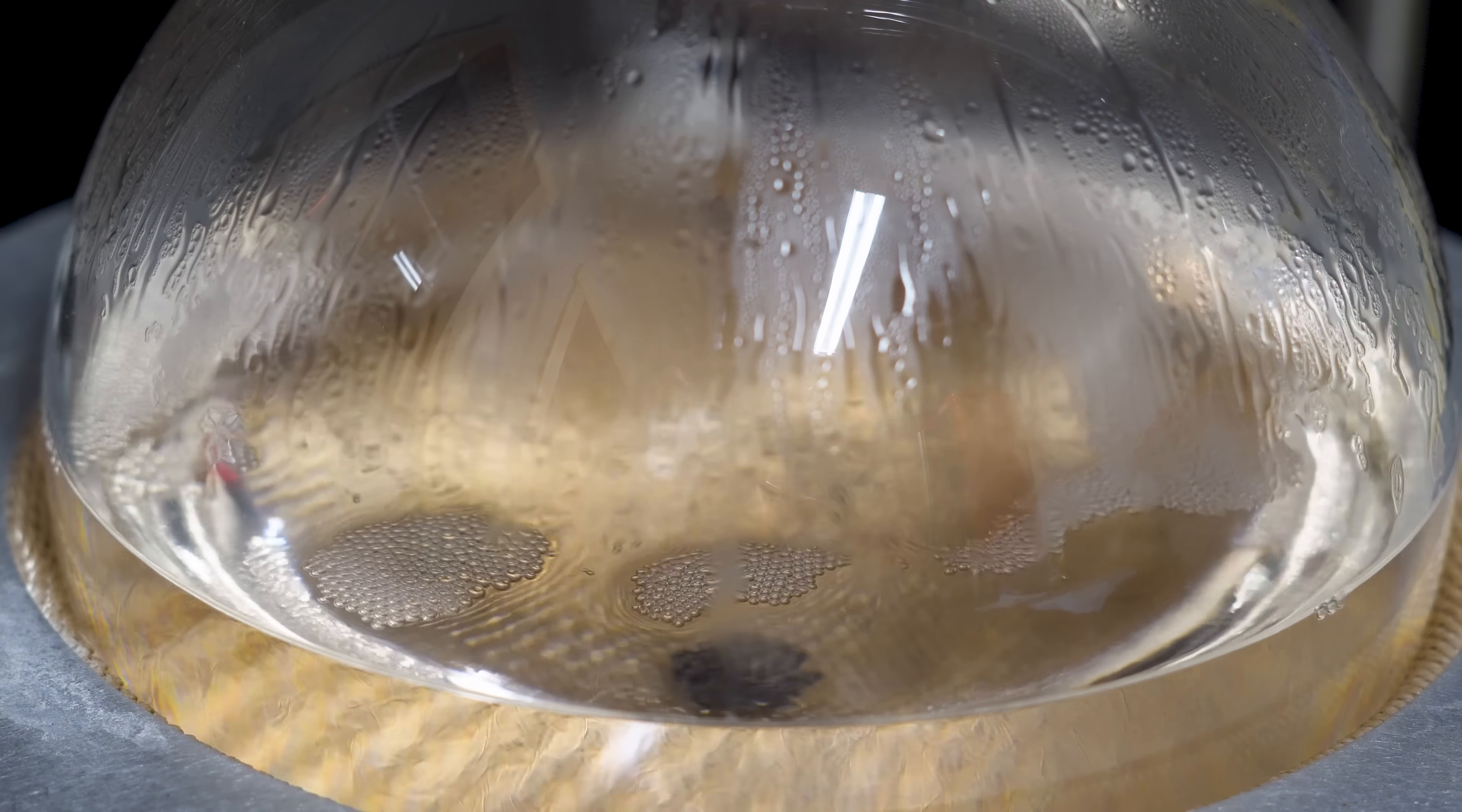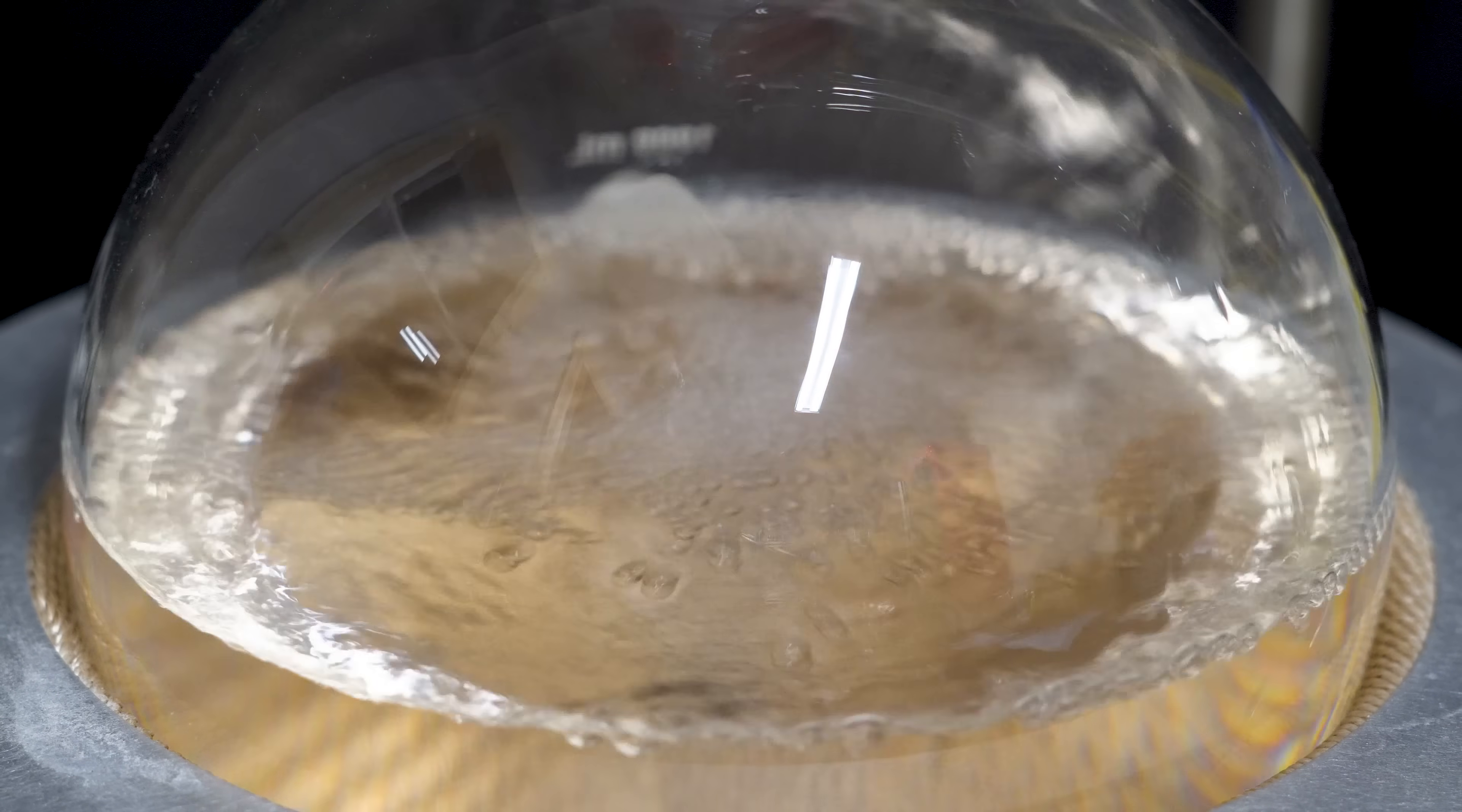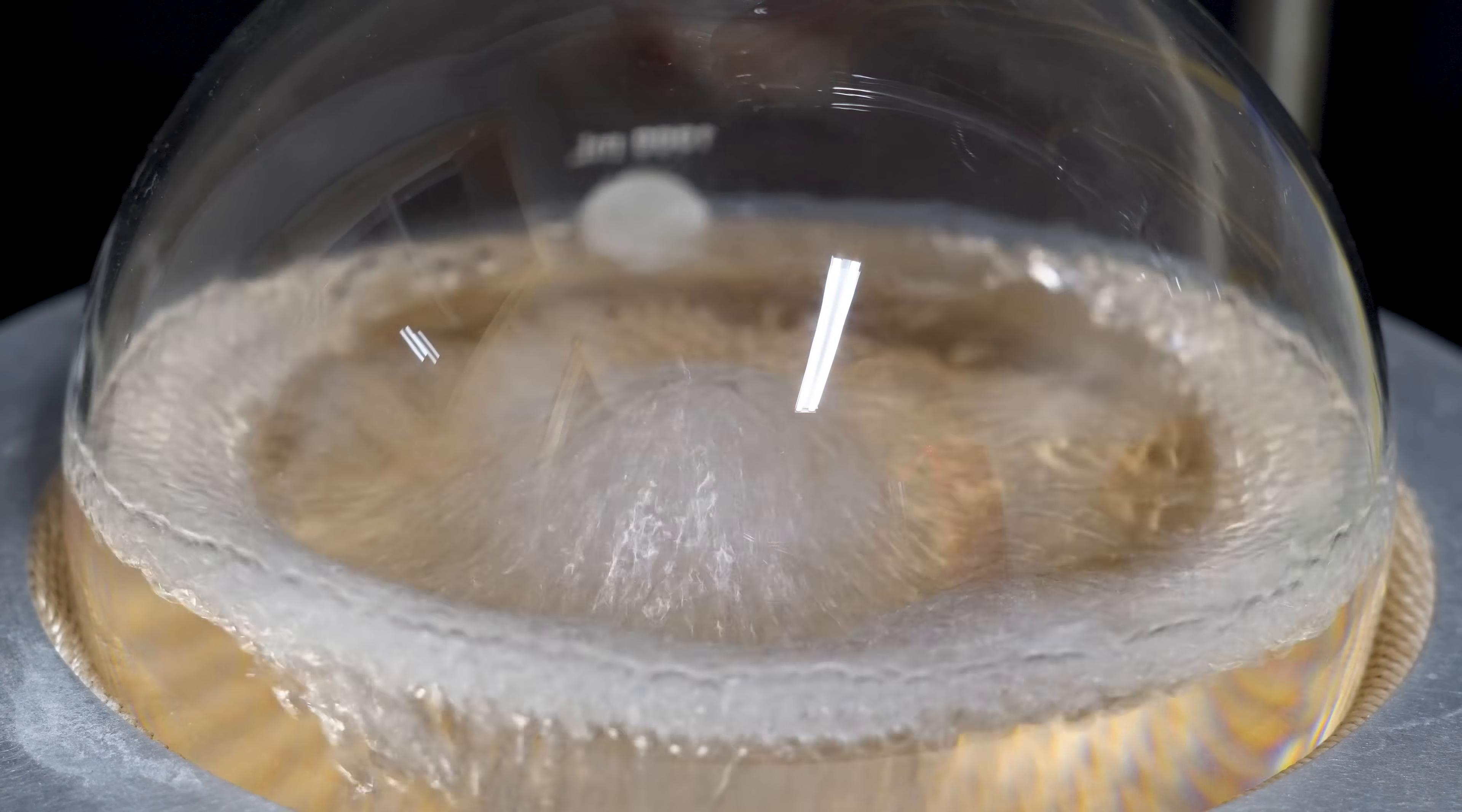As the solution heats up, our distillation is starting to happen. Luckily, no frothing started to happen, and we can proceed forward with a fractional distillation.